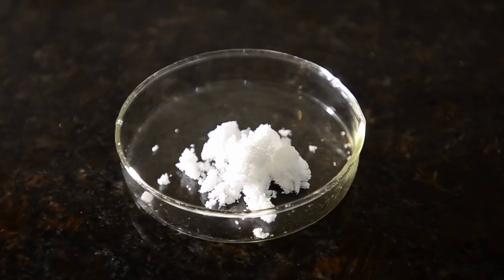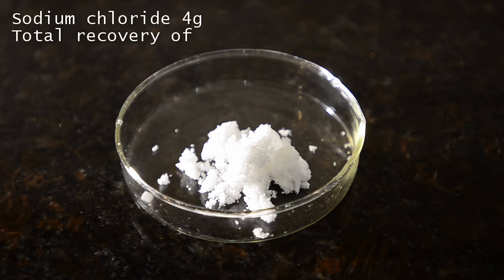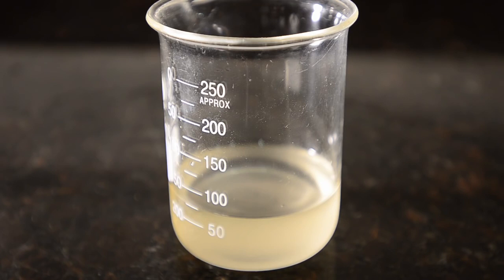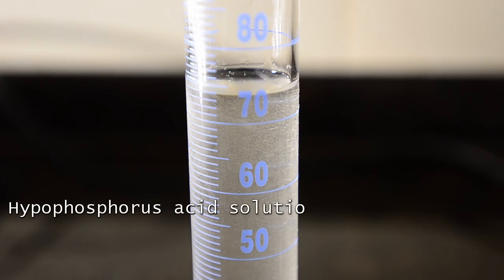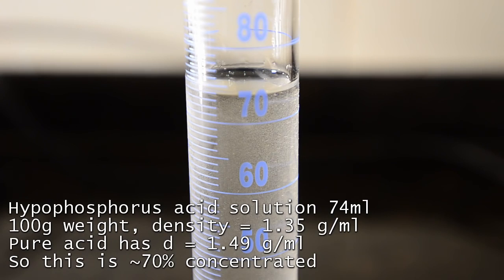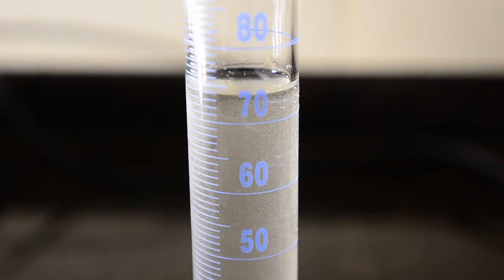We got a further 4 grams of sodium chloride from this filtration, so we figured that we must have a relatively strong hypophosphorous acid solution by now. And here's the filtrate, exactly 100 grams in weight and measuring 74 mils, giving a density of 1.35. The pure acid has a literature density of 1.49, so this is looking good.